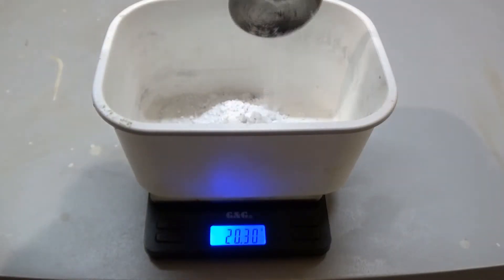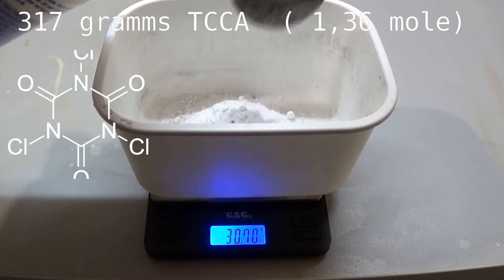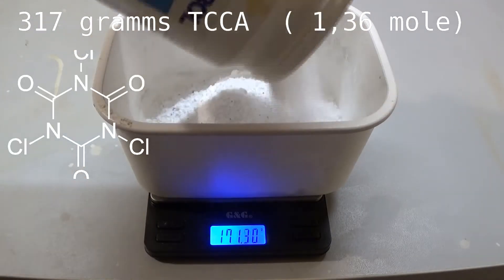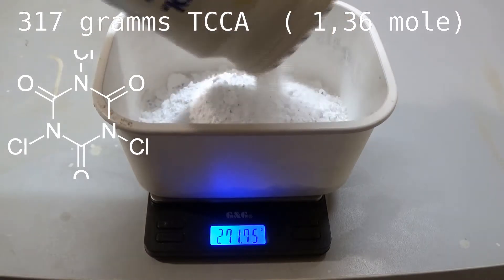For this I weigh out 317 grams of trichloroisocyanuric acid, short TCCA, as my source for the chlorine gas.